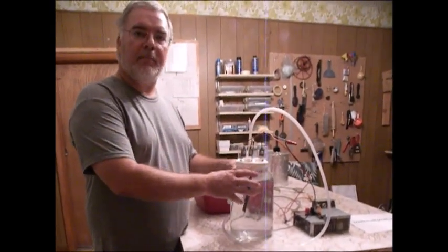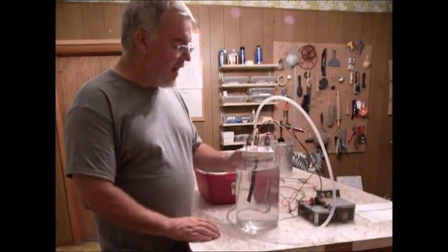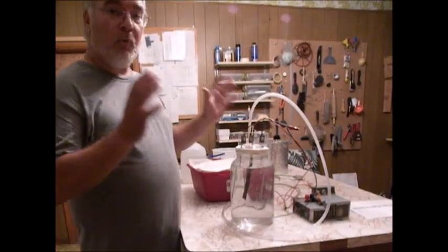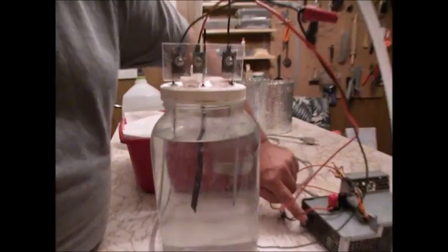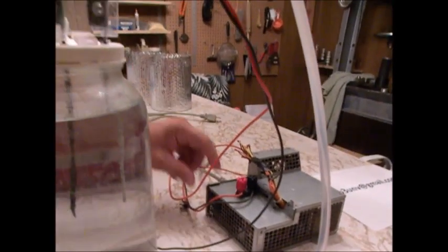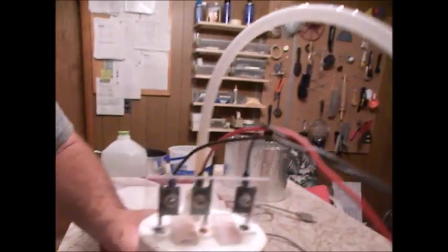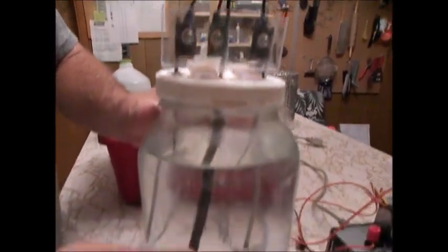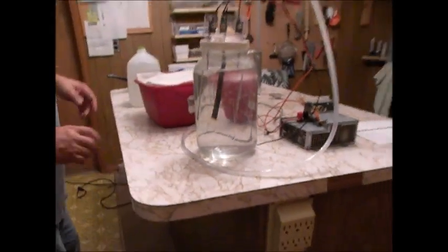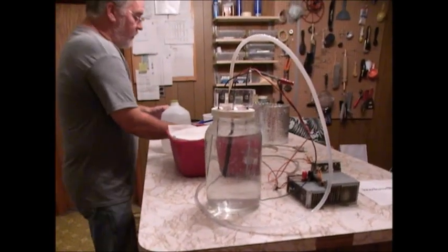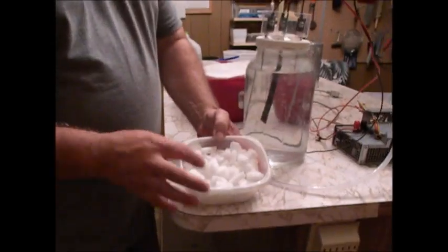First thing I'm going to talk about is the operation of it. That portion is extremely simple: fill with solution, turn on the switch, and it works. So that part is very, very simple. But next thing we need to know is what do we put in here for a solution to produce potassium chlorate.